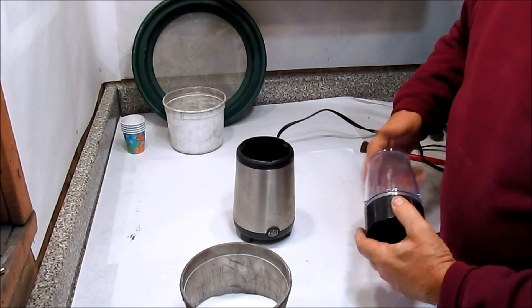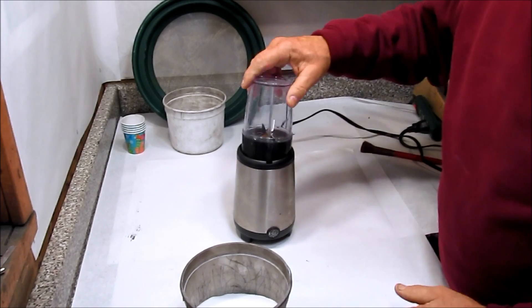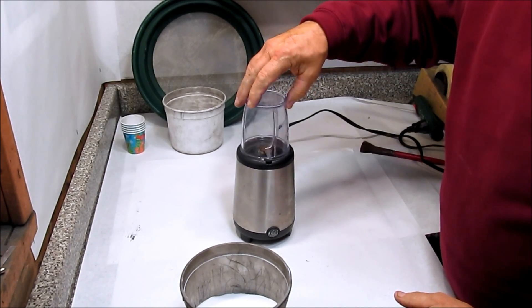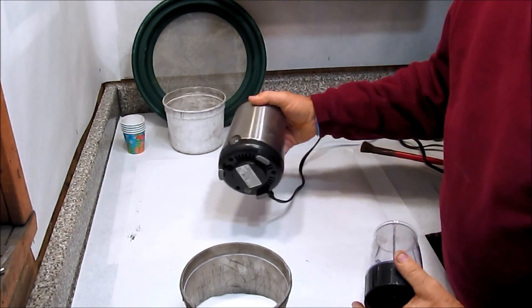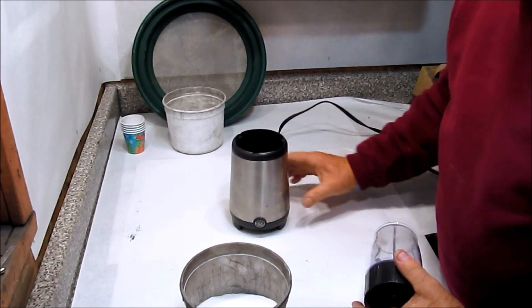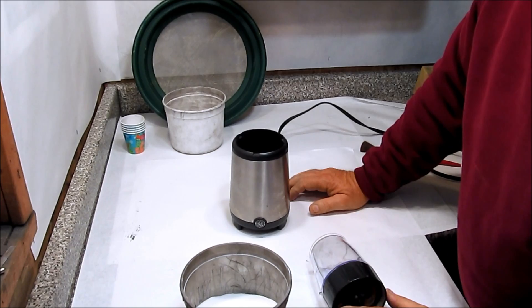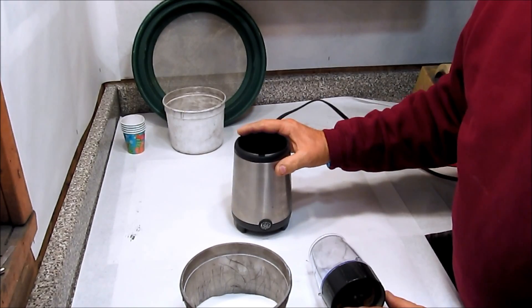This will spin that blade at a very, very high speed. Doesn't burn. It's a heavier duty implement than a coffee mill and still only costs about twenty dollars.